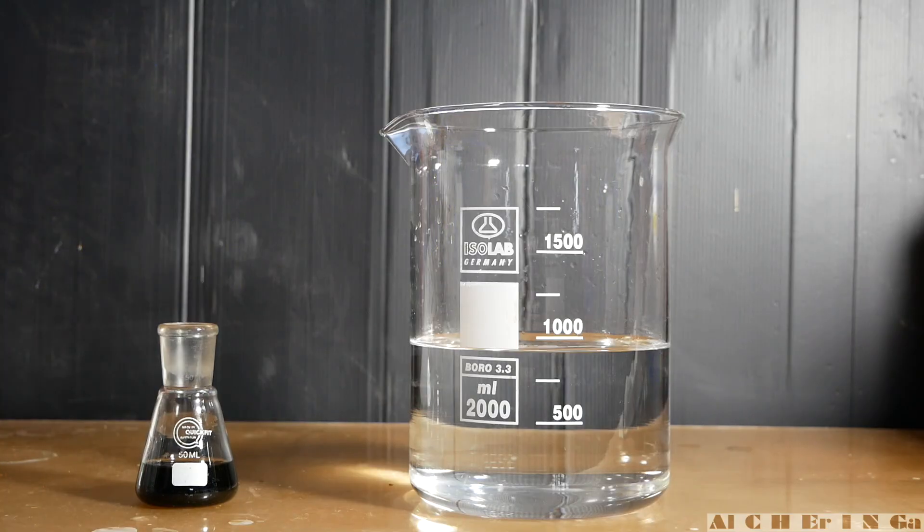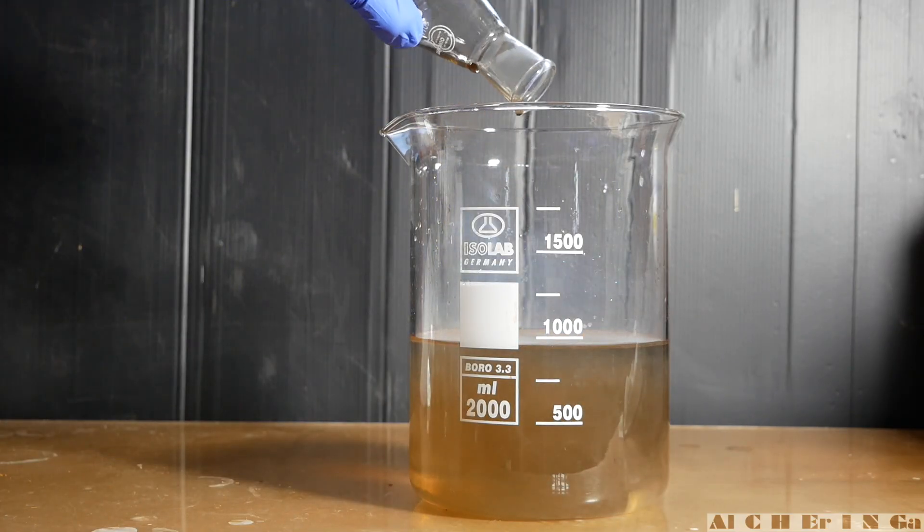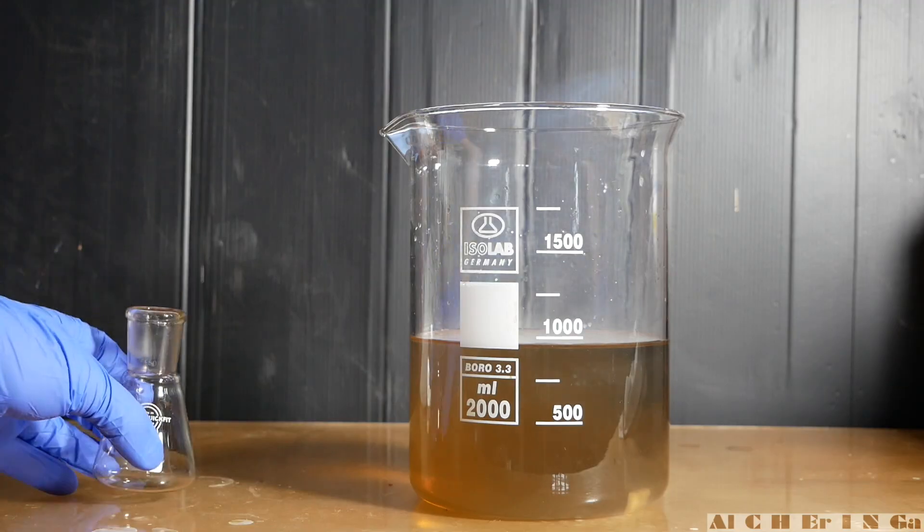Get the mixture and pour it in the aqueous solution. The dark mixture swiftly turns to a beige color giving off a light mist.